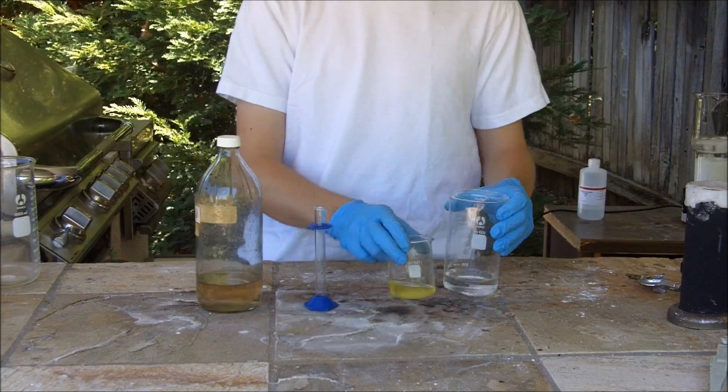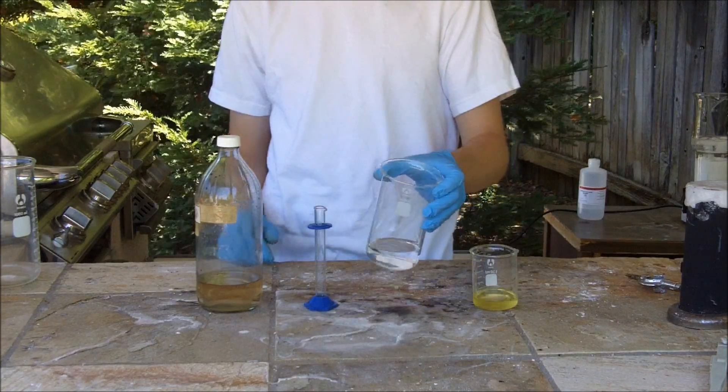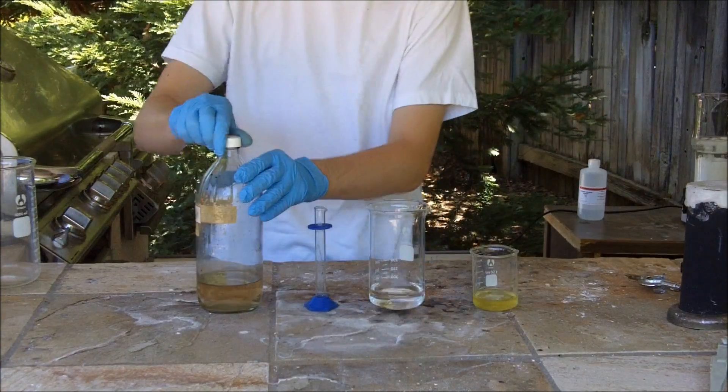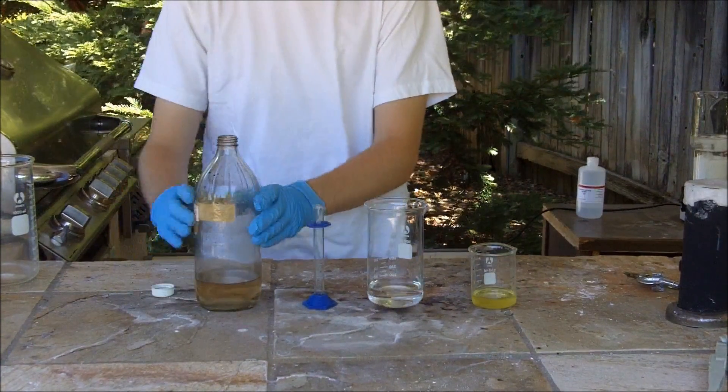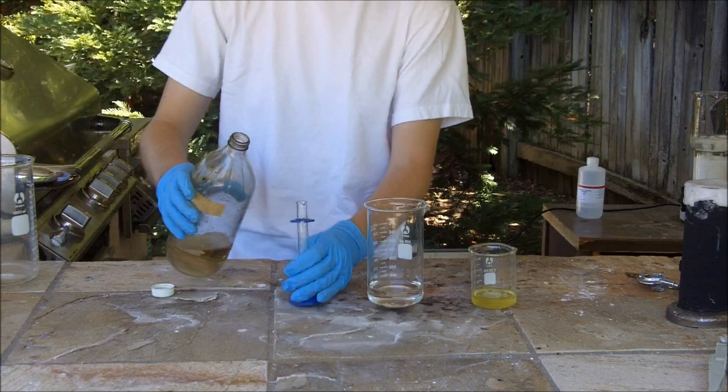Okay, now that I have got the ketazine in this beaker, I am going to get my 500ml tall form beaker and add to it 100ml water. Next, I will pour in 20ml of concentrated sulfuric acid.